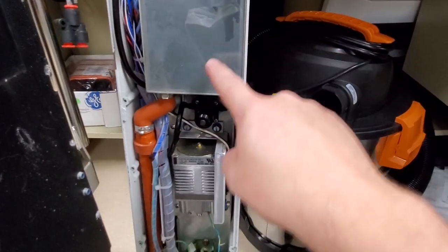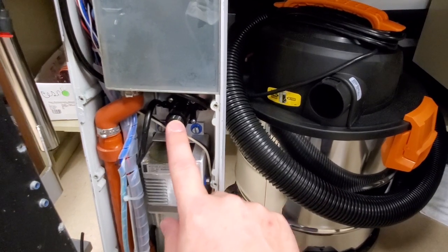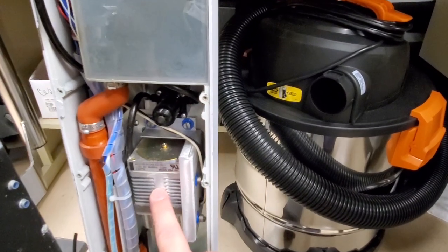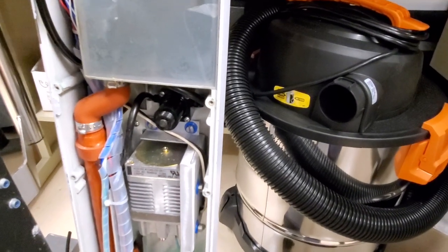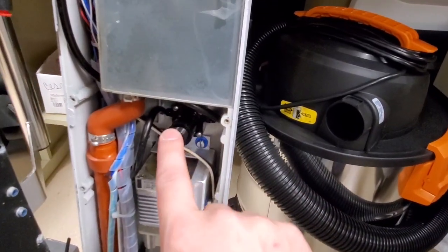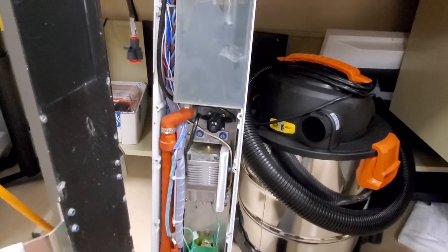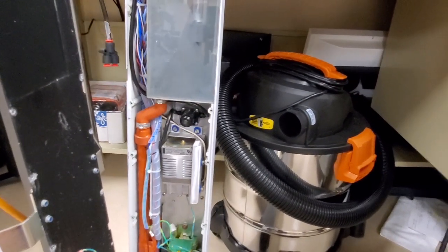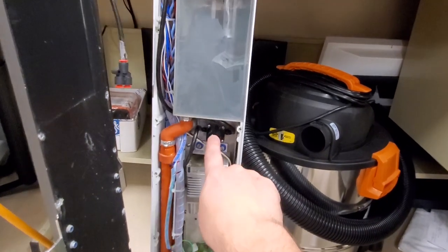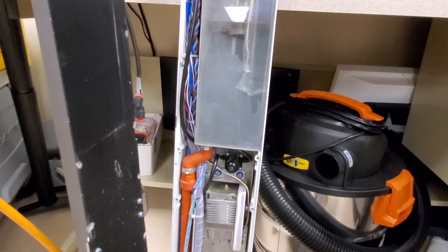And that comes in right here and you see this little guy right here. This is your pressure regulator for the pump. The pump will keep going and going and going building pressure until mechanically it just gives out. This guy is actually in overpressure. So what I'll do is I'll hook my manometer up to this guy right here. You turn the unit on, it immediately goes to pumping air and you set your 300 millimeters right here by this guy. I have had to do that before.